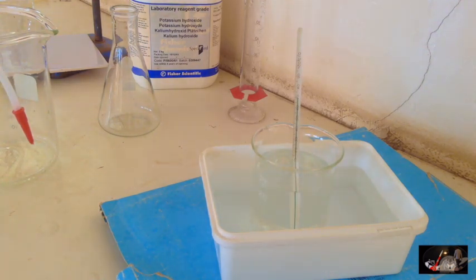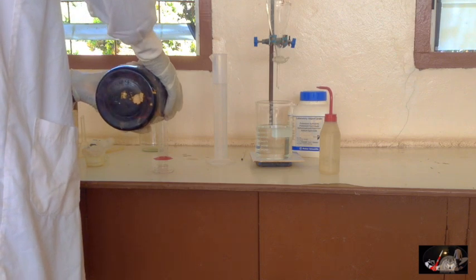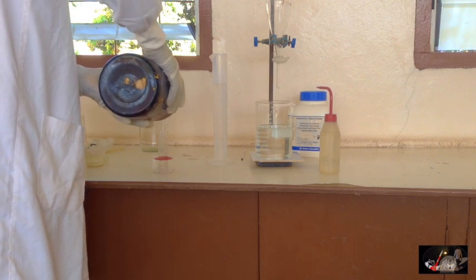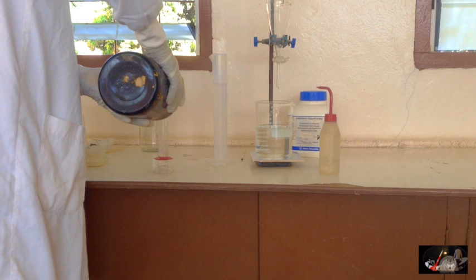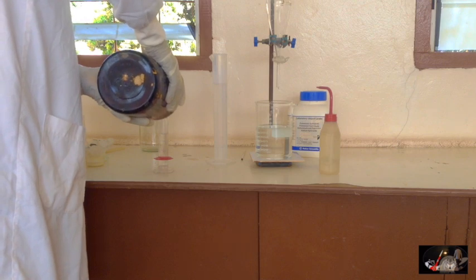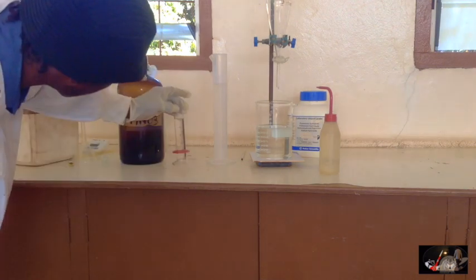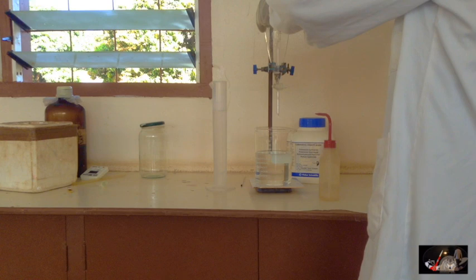After allowing the solution to cool down to room temperature, you then measure 100 milliliters of concentrated nitric acid using a measuring cylinder. This is my setup: a separating funnel on top containing the acid, running directly into the alkaline solution below.